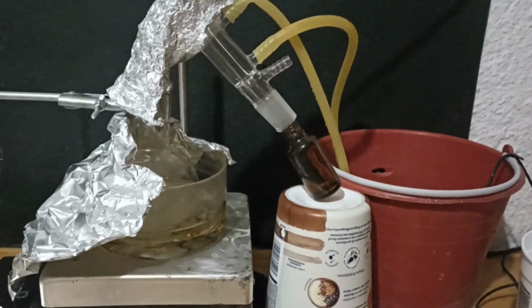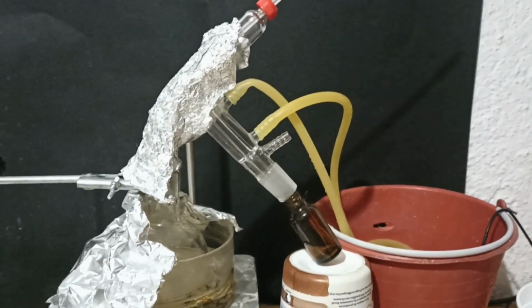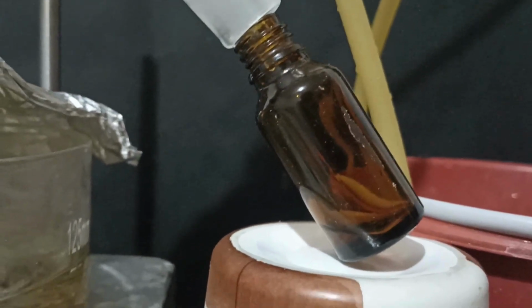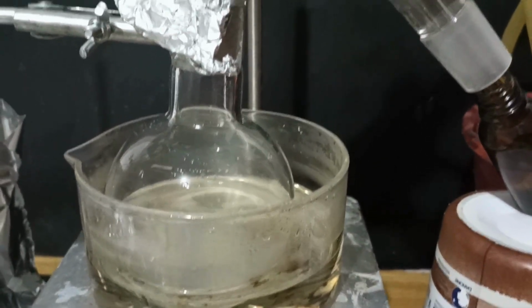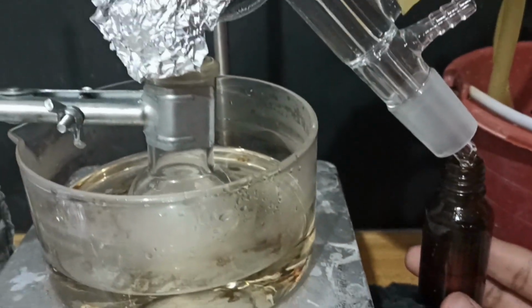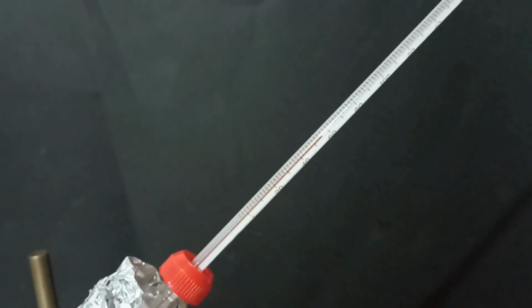After 3.5 hours, no more distillate was coming out, so I finally shut down the reaction. Until this moment, I only had a bunch of distillates from the acid and basic hydrolysis. So I first mixed the acid ones in a round bottom flask and started a short path distillation. I was so happy when around 8 milliliters of diethylamine was collected before the temperature started rising. I did the same with the basic hydrolysis distillates, and I obtained almost 12 milliliters of diethylamine.